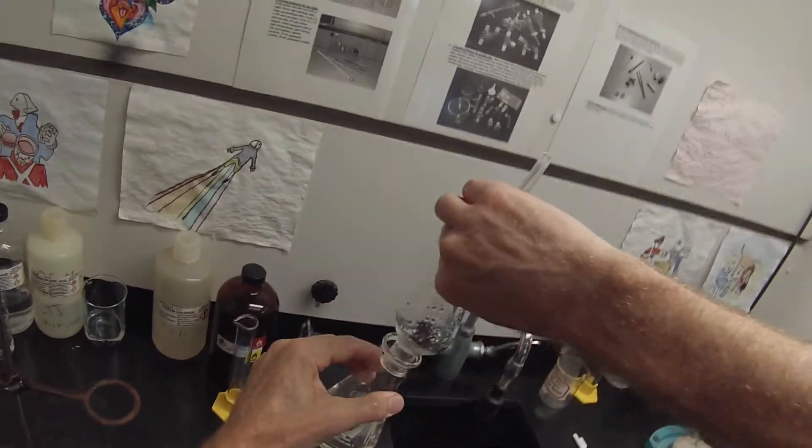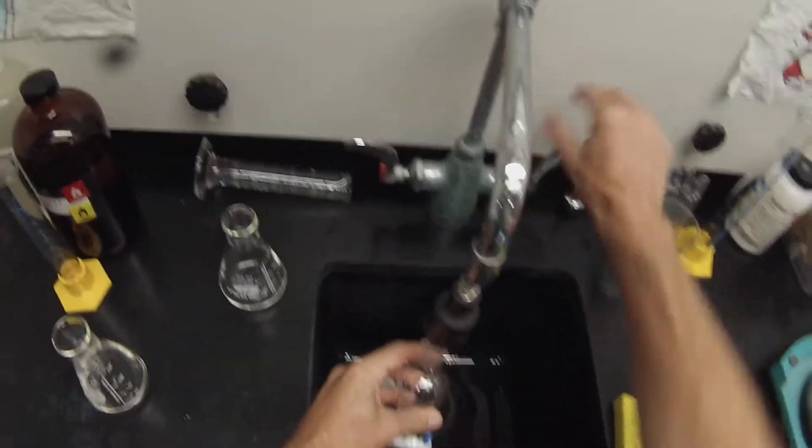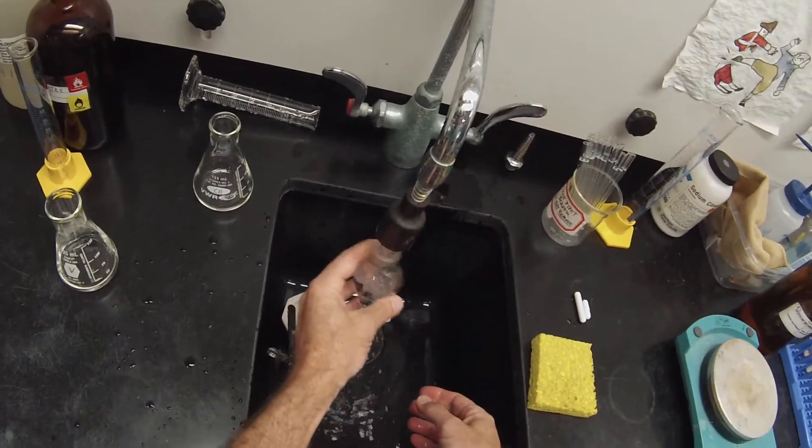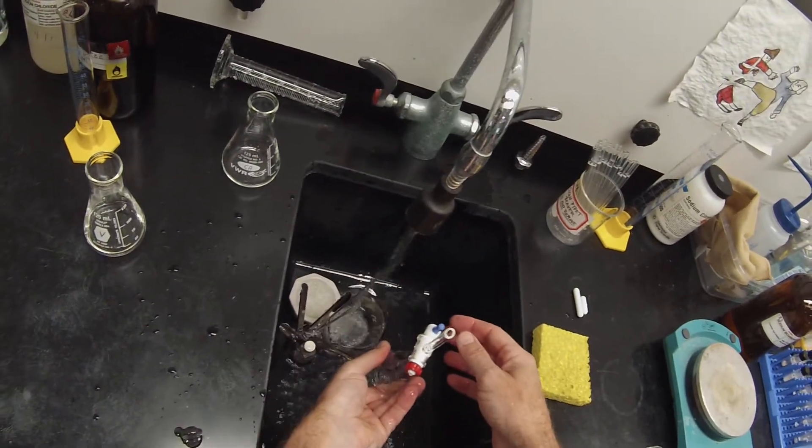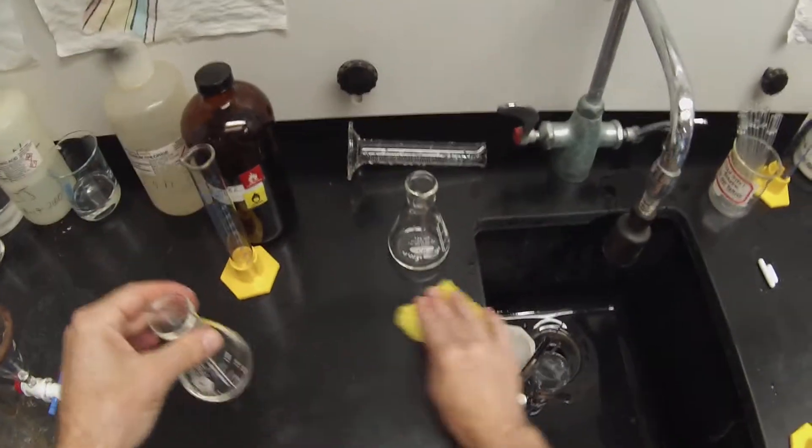The MTBE layer which we hope contains vanillin is going to be transferred to our V flask. I can rinse the separatory funnel because I'm going to use it again to extract the cinnamic acid once I've neutralized that solution. My sep funnel is at the ready. What I need now is the anhydrous sodium sulfate to dry that vanillin solution, to make sure that there's no water when I transfer that onto the rotavap. I forgot to get that out this morning.